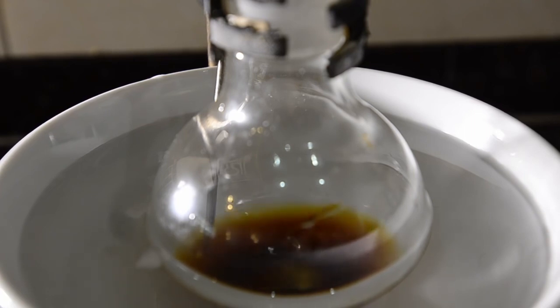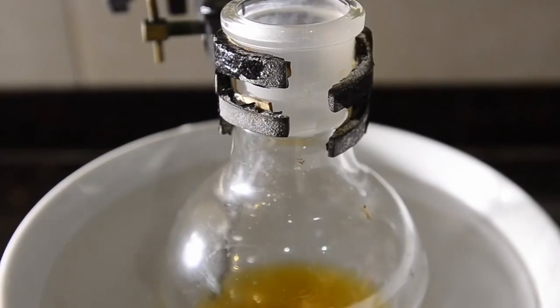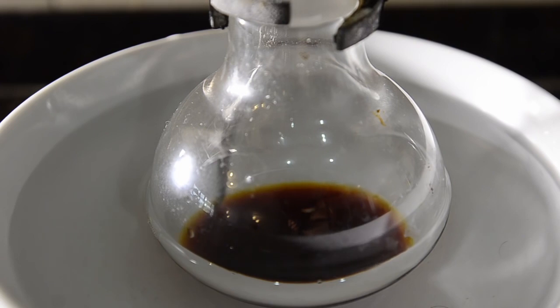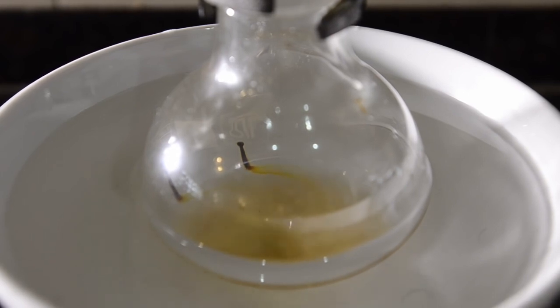So we continued adding the solid iodine slowly to the mixture, and we started to see it dissolving and forming a brown color. And after a few minutes the brown color disappeared again to leave the yellow solution with the iodine dissolved completely. So we added the remainder of the iodine and allowed it to dissolve in the reaction mixture. Here we go. Everything now in solution.